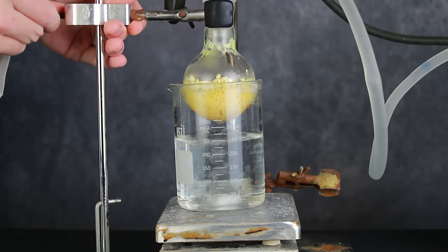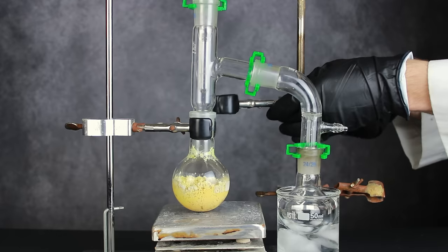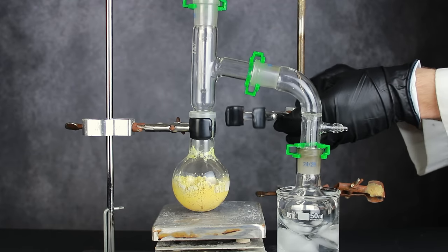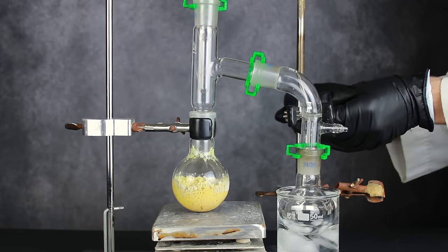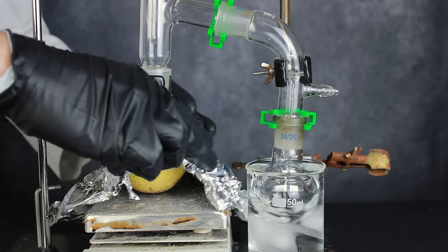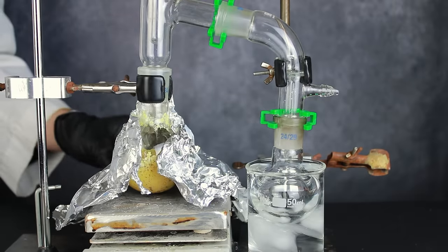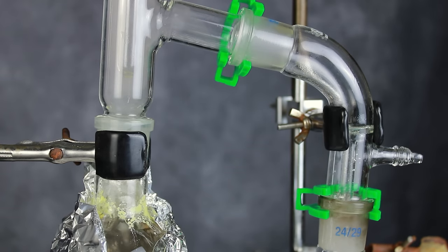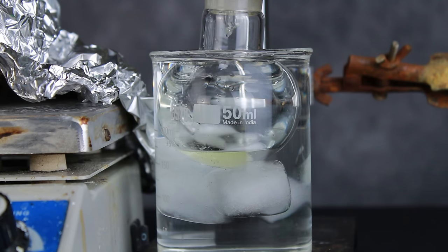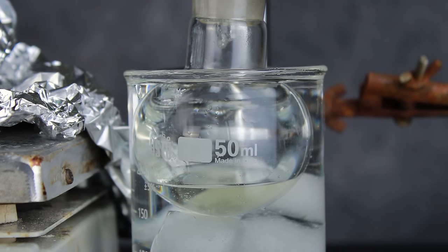In theory, it would have been best to perform this distillation under vacuum, but I wasn't in the mood to mess up my vacuum pump with acidic vapors and stinky smells. So I cranked up my hot plate, wrapped the reaction vessel in aluminum foil, and began distilling off my precious product into an ice-cooled receiving flask. Much to my delight, a decent amount of liquid actually came off, and best of all, it wasn't yellow enough to be sulfur monochloride. This first distillation worked out great.